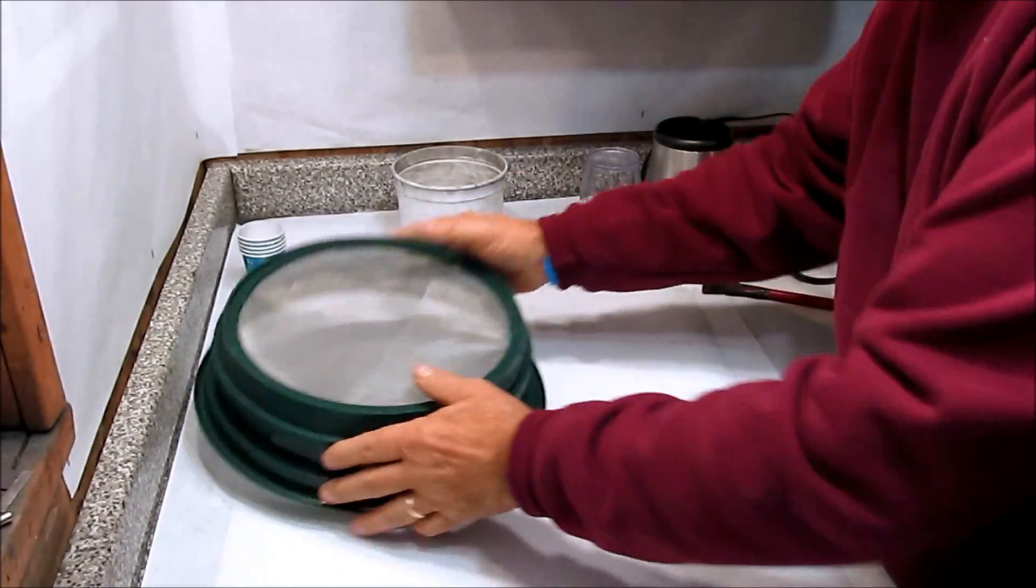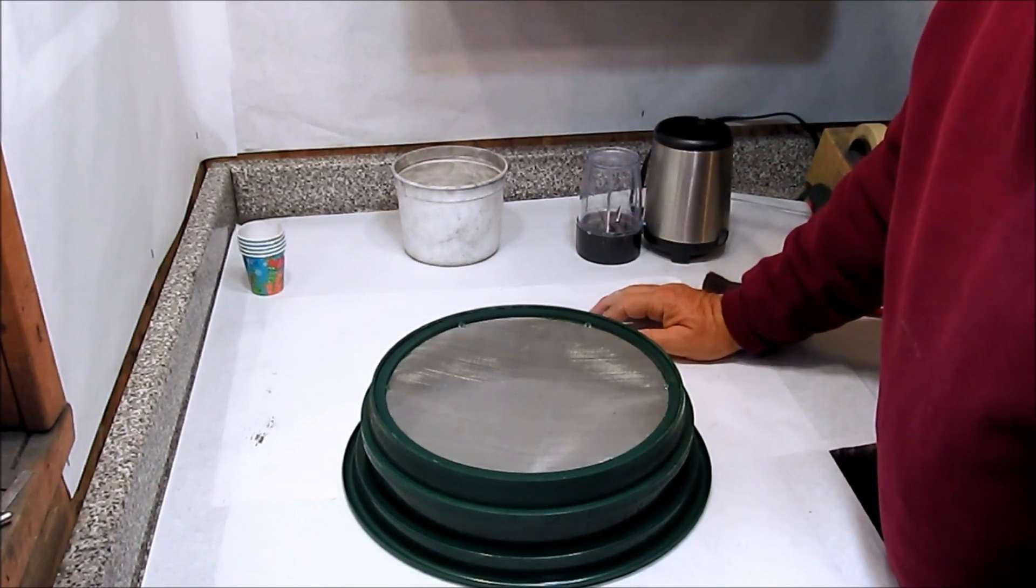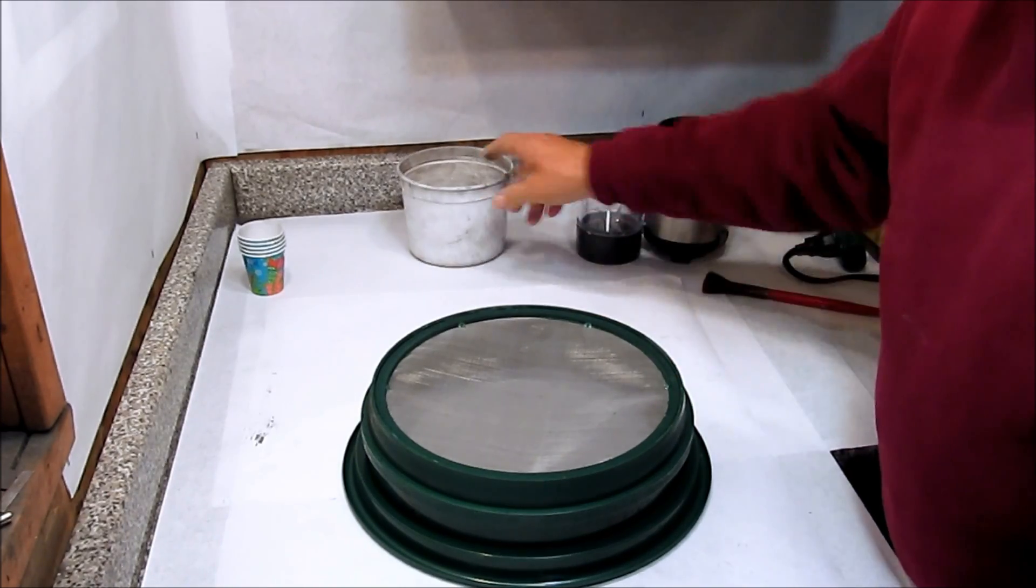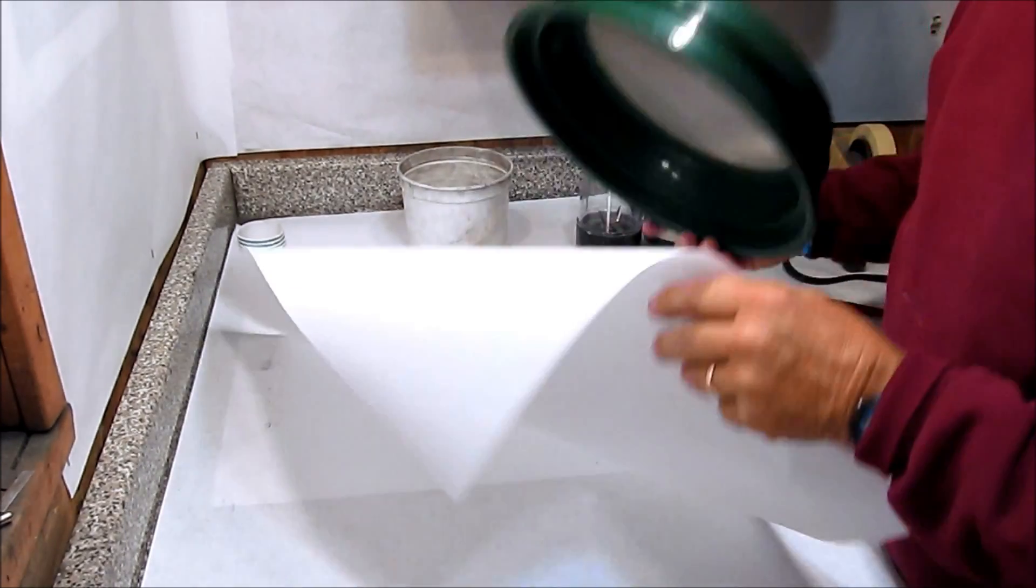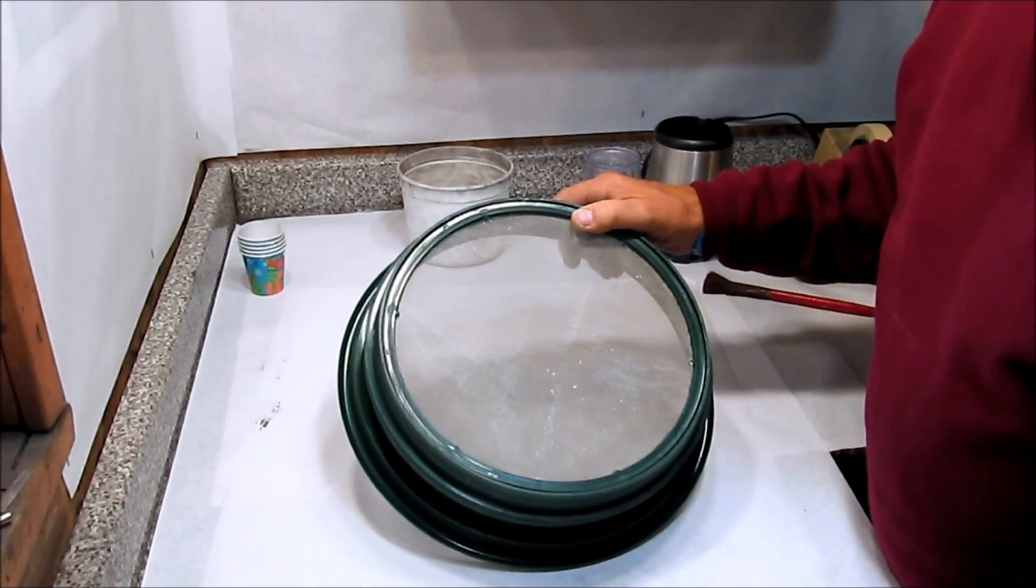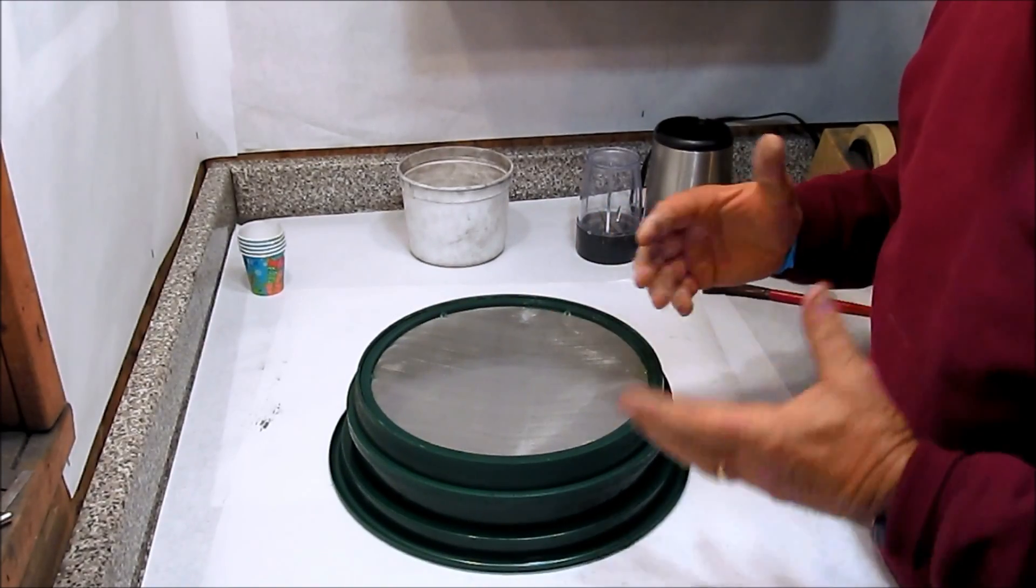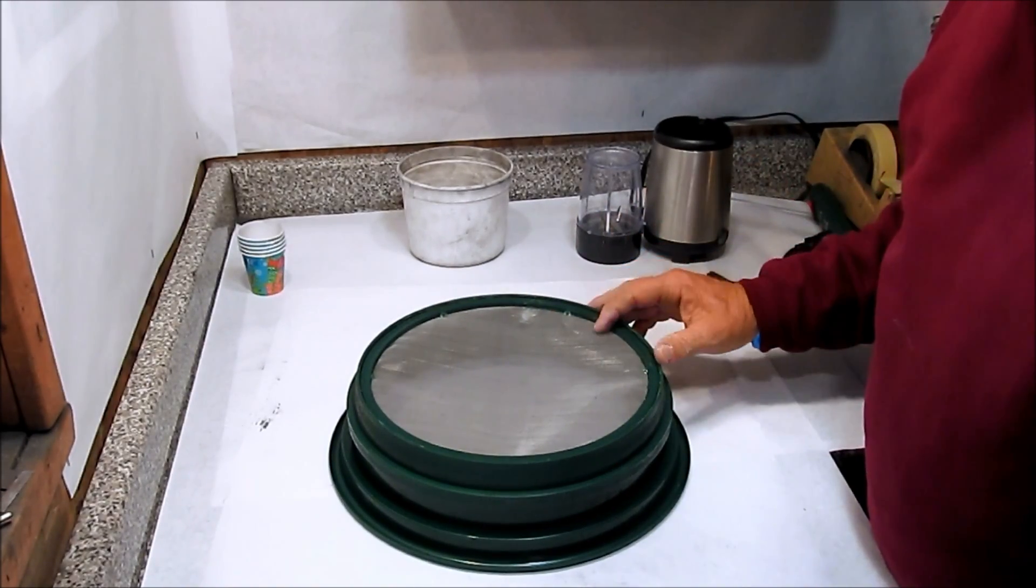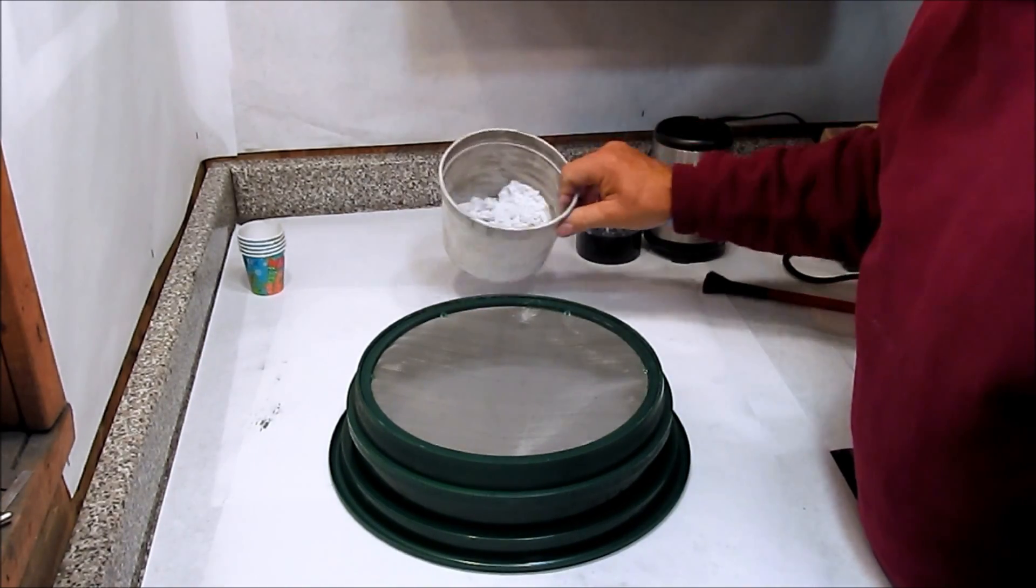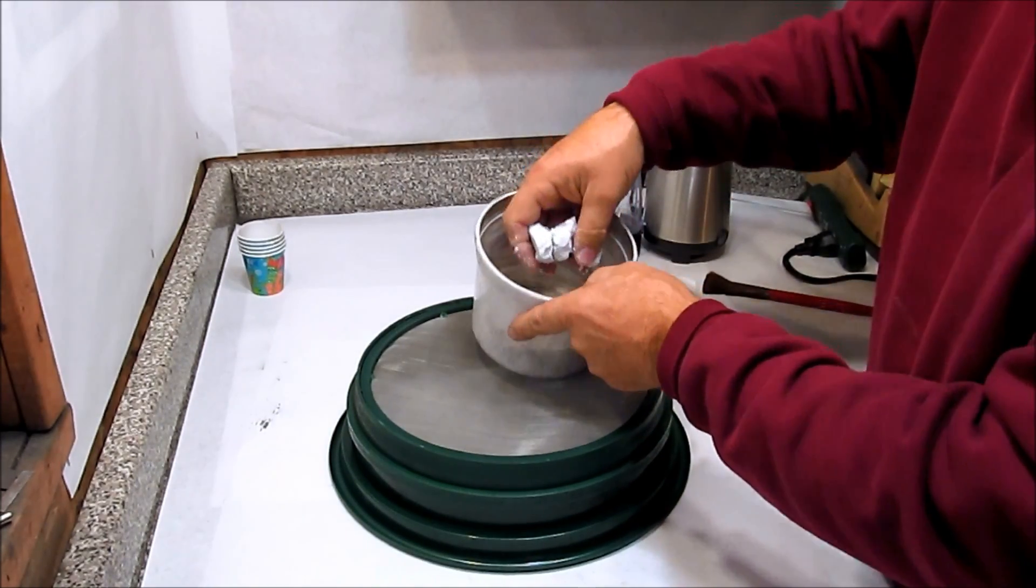When screening something like I'm about to do, I'd often do this outdoors wearing a dust mask, but I'm filming this for demonstration purposes. I have a separate sheet of paper on the table and this is my 50 mesh screen. When I find chemicals specified, it's normally understood that it ought to at least pass a 40 or 50 mesh screen if not a 100 mesh screen.